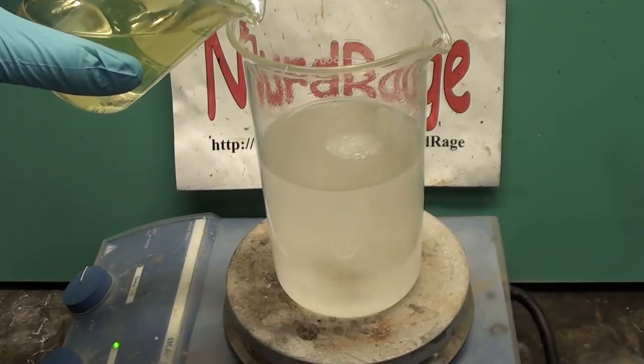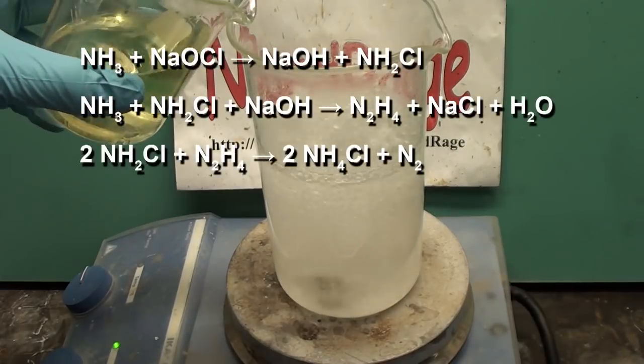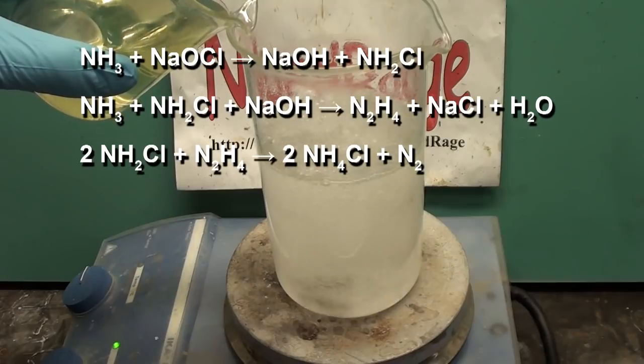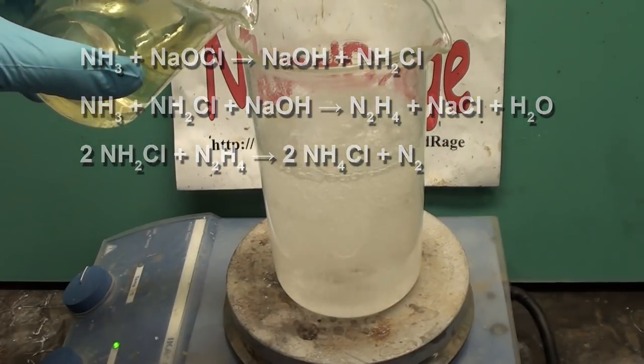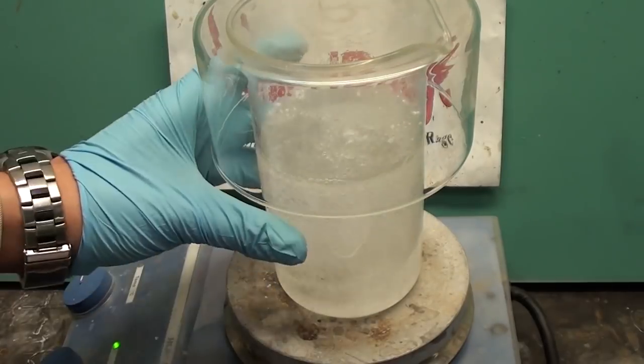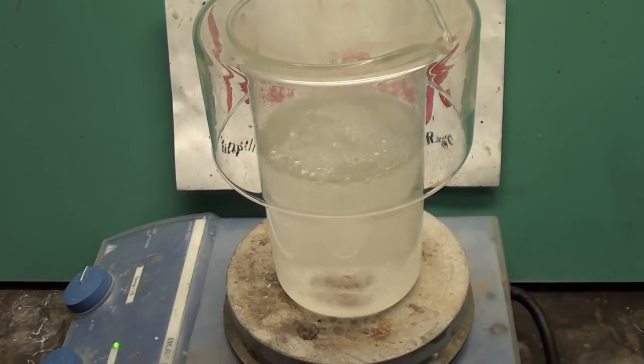Add the bleach slowly as it's going to produce a lot of gases, mostly nitrogen and ammonia and some traces of chloramine and hydrazine, so this must be performed in a fume hood or outside. Occasionally cover it and let it react, and then add bleach again when it stops bubbling.